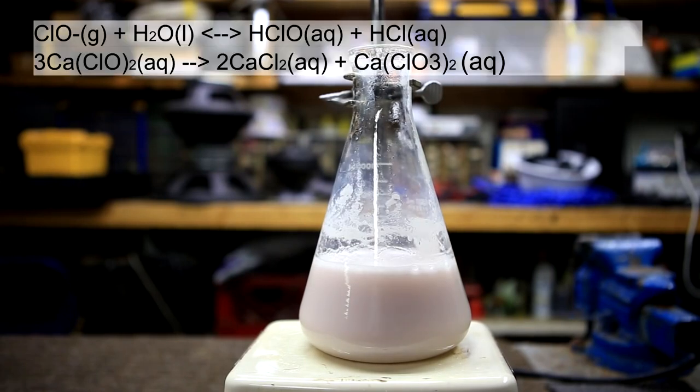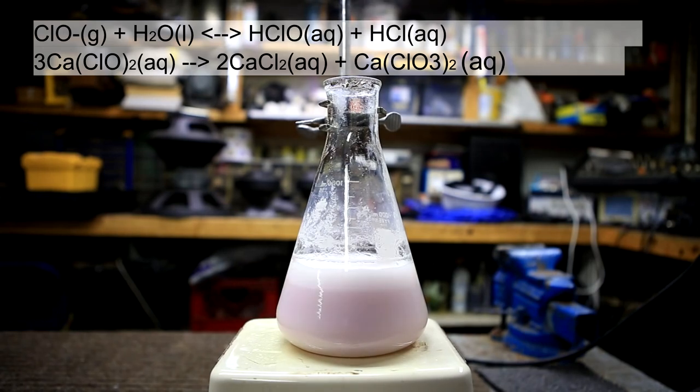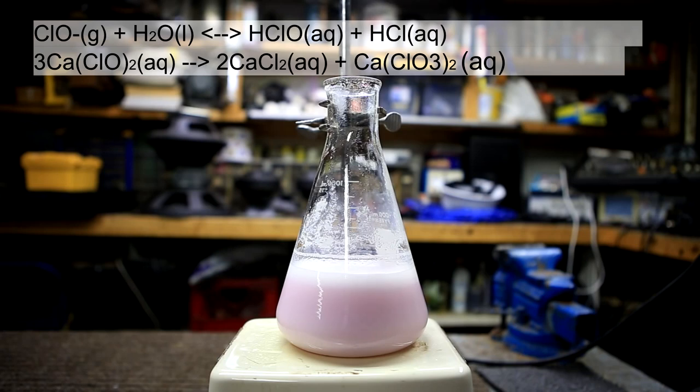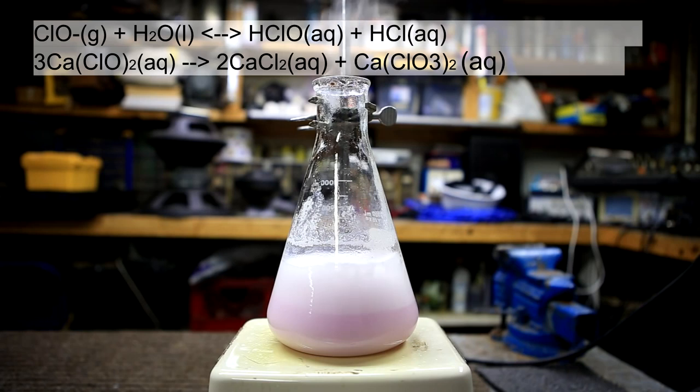The reaction occurring is a disproportionation reaction. Calcium hypochlorite dissolves in water and the hypochlorite ion reacts with water to produce hypochlorous acid and hydrochloric acid. Then in the presence of heat and hypochlorous acid the calcium hypochlorite disproportionates to calcium chloride and calcium chlorate.